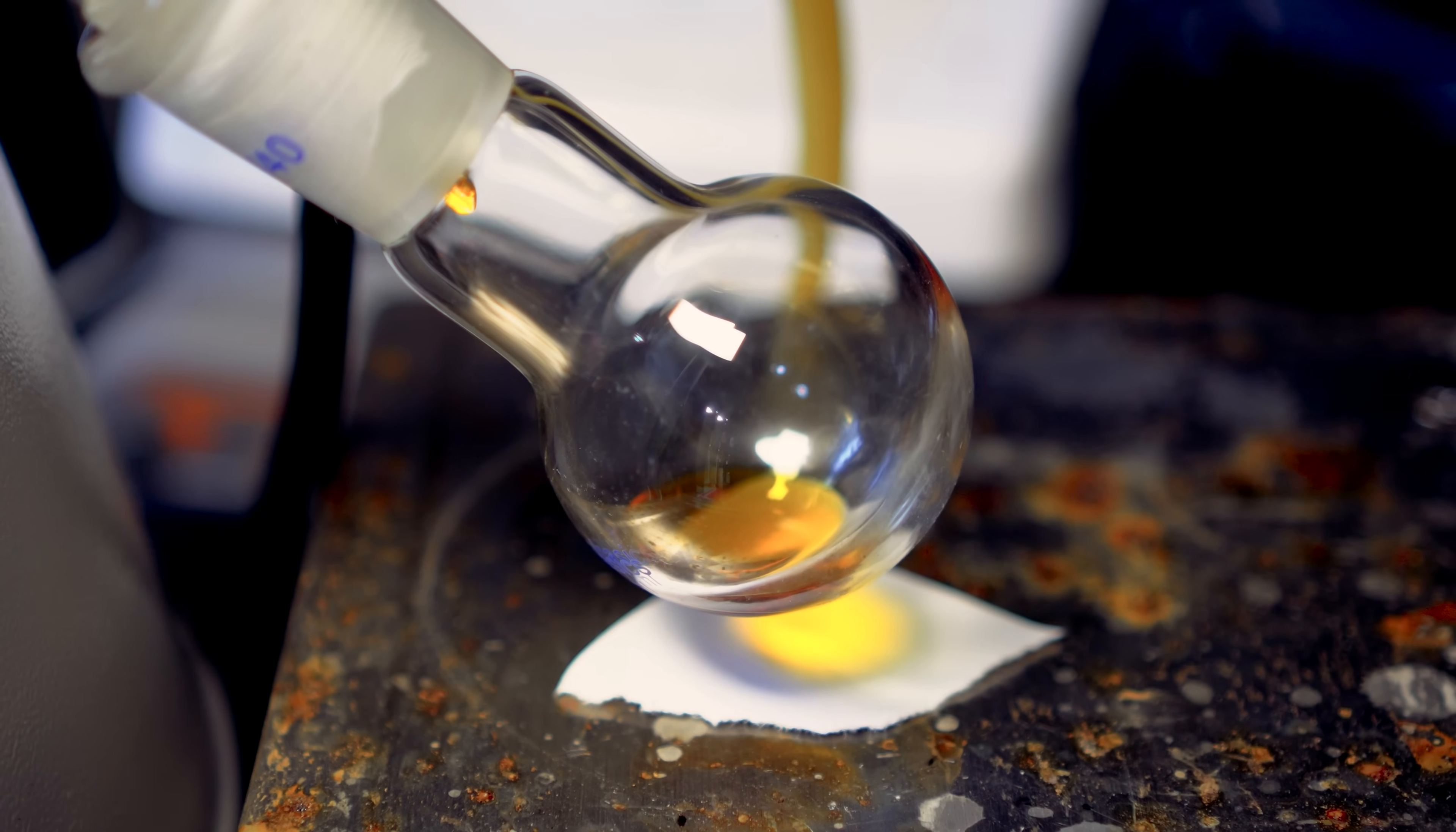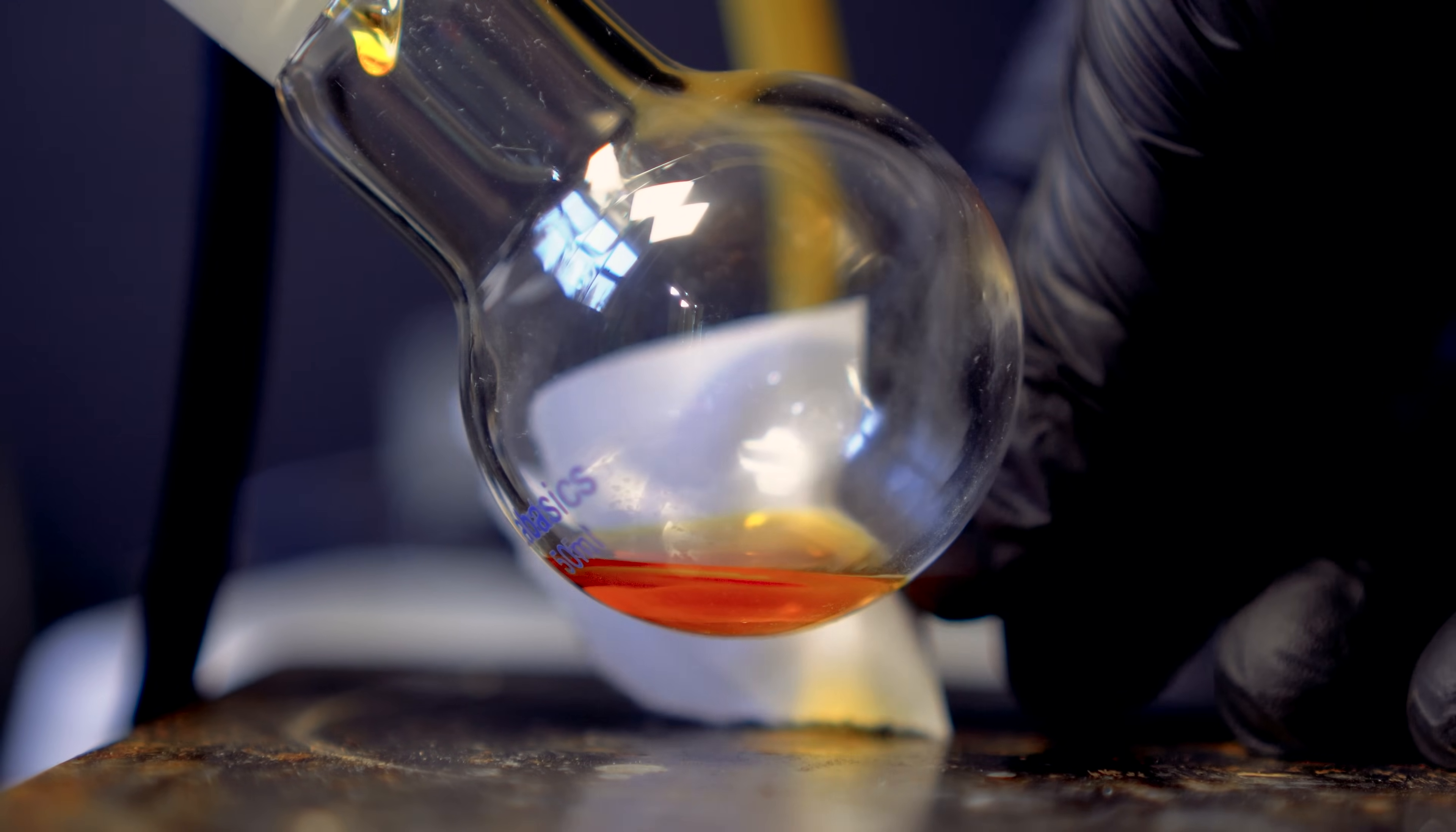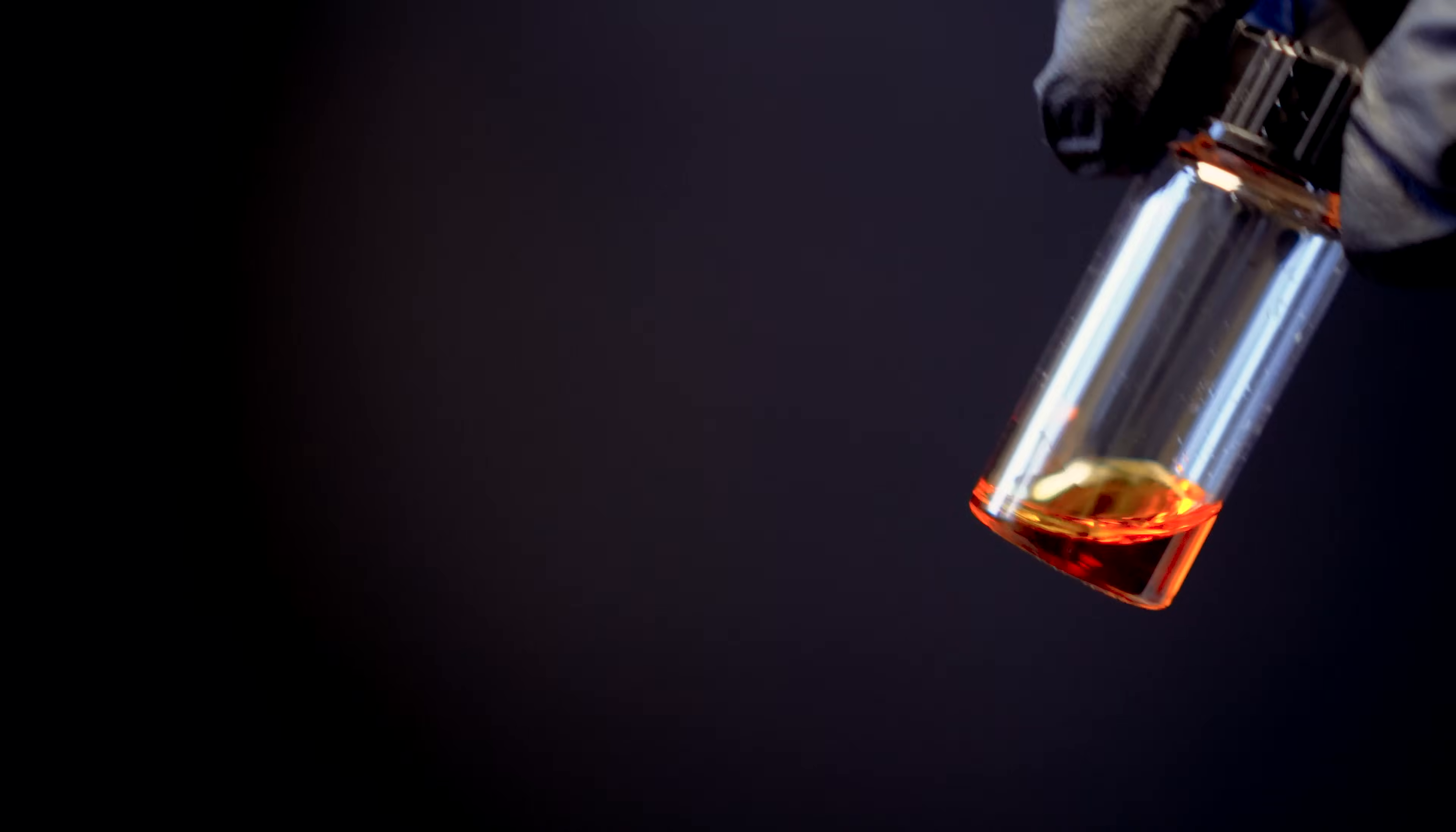I know I lost a little bit of it as I could see some oil but it just wouldn't go over. Overall I would say it looks infinitely better and I'm pretty glad I did this. Chromatography probably would have worked really well however I really just didn't feel like doing it. I tried using a white piece of paper to show you the color of the propofol and it's a yellowish-orange. You can also see in our boiling flask that we have this disgusting impurity. Overall I really don't know what that is.